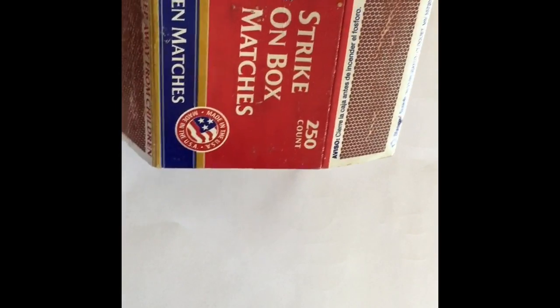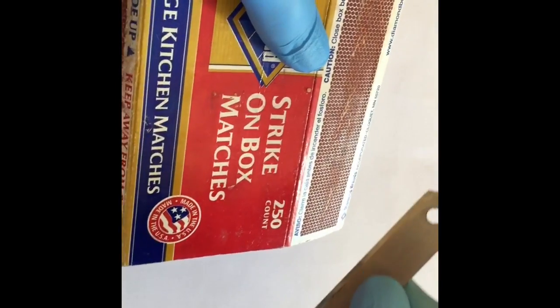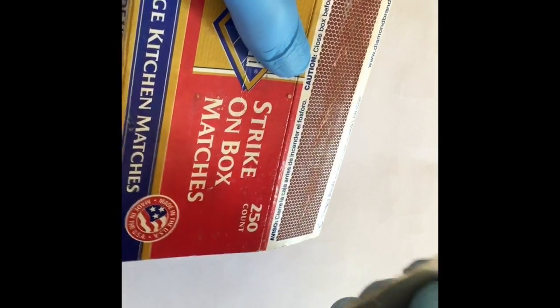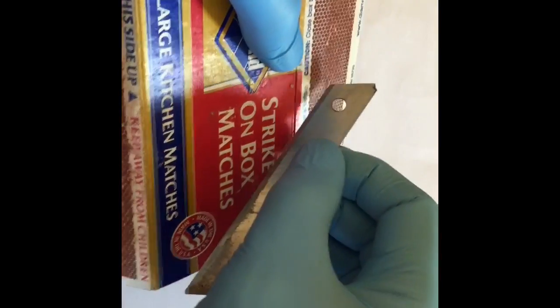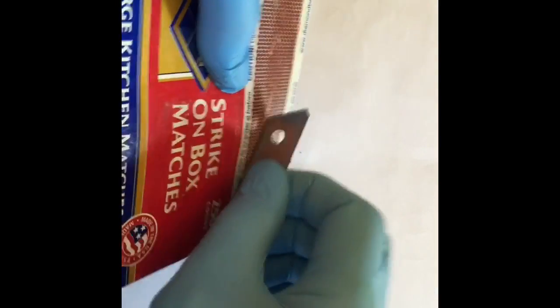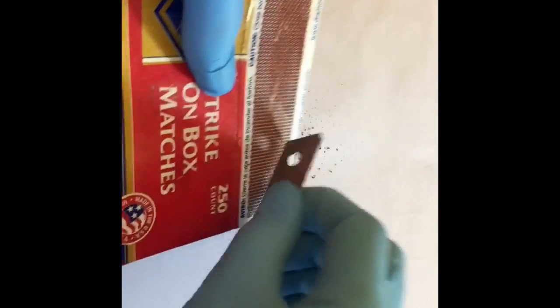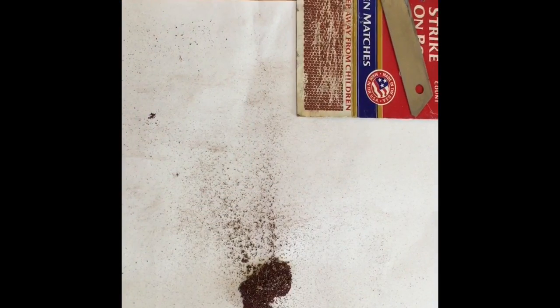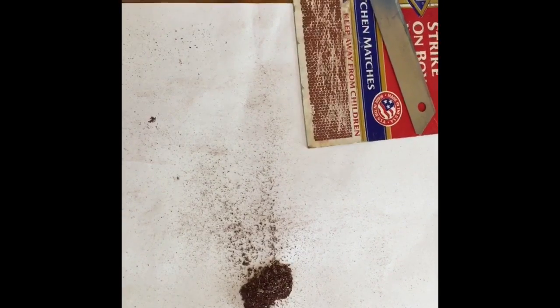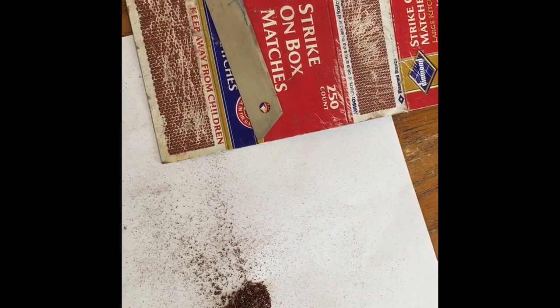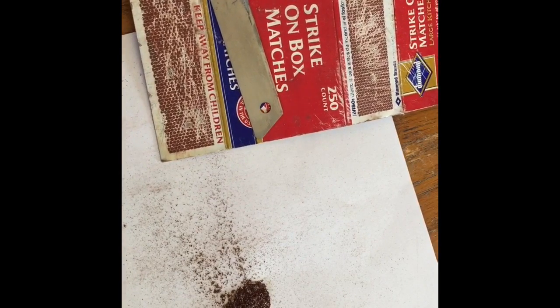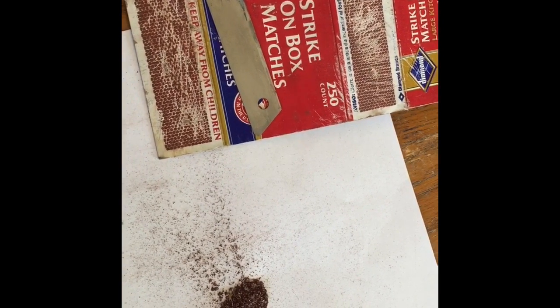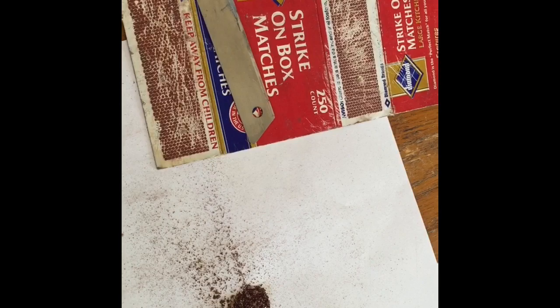The first thing we want to do is get some of the striker material off of a matchbox, and the best way of doing that is just with a blade like this, scraping it off. I've just about finished scraping most of that off. Any more scraping will just take the paper and glue that's underneath it off. That's just from a single matchbox and you can see I've got a good amount there.